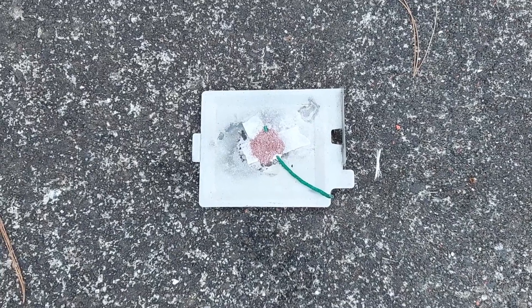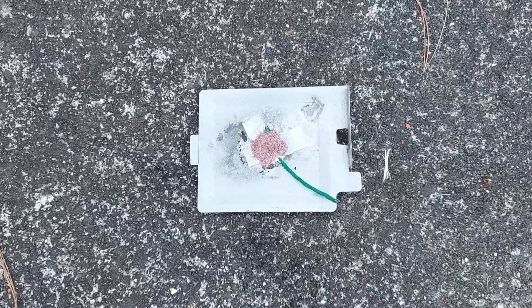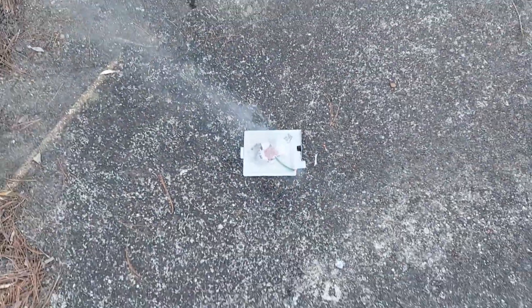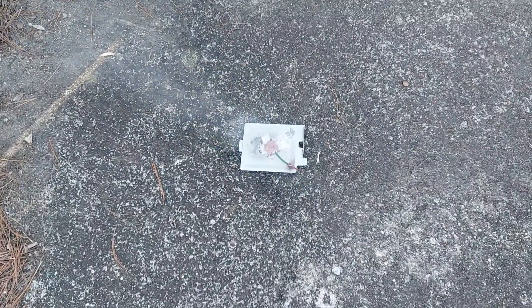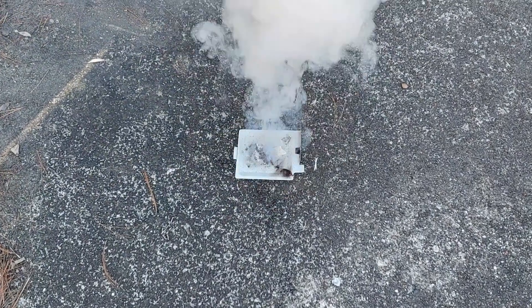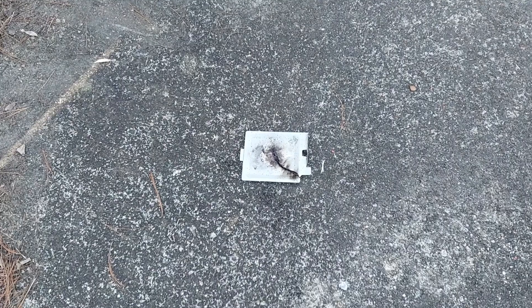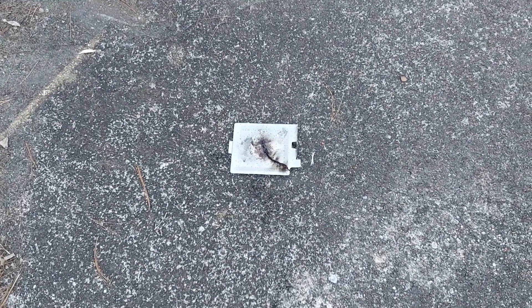This one I mixed the HDP with just pure copper powder. Let's see what happens. A smoke bomb, interesting.